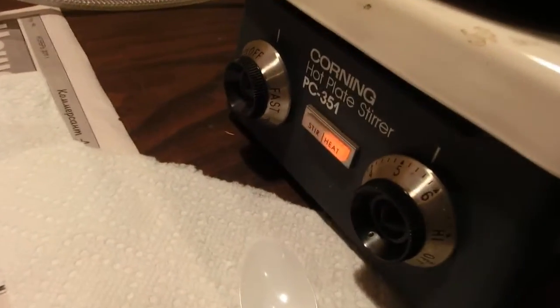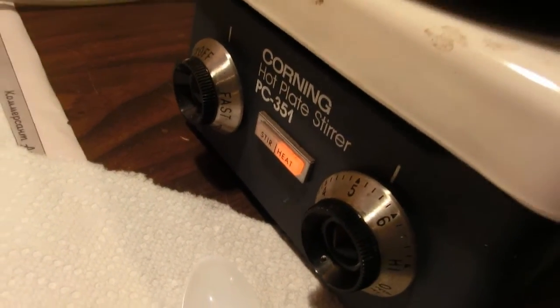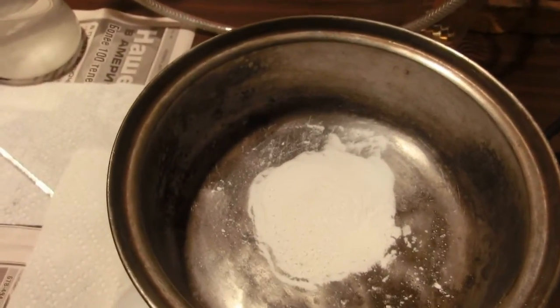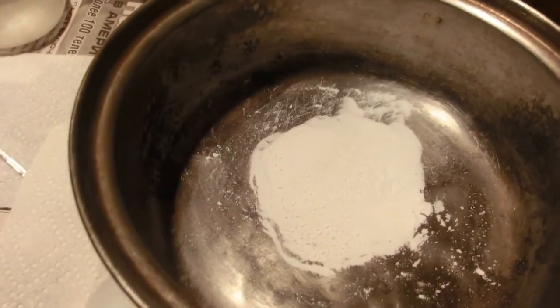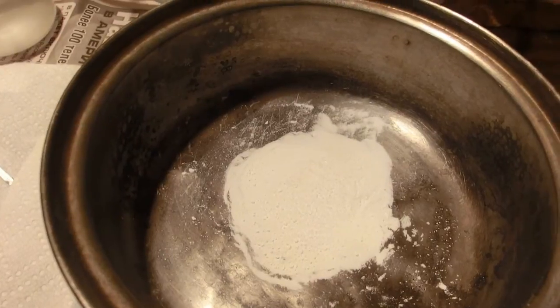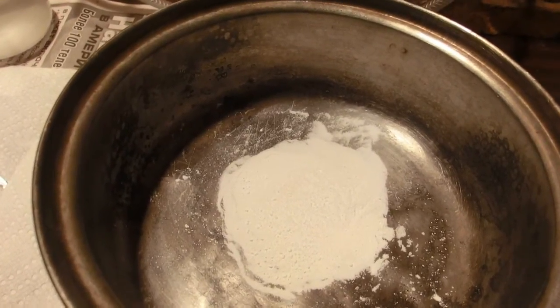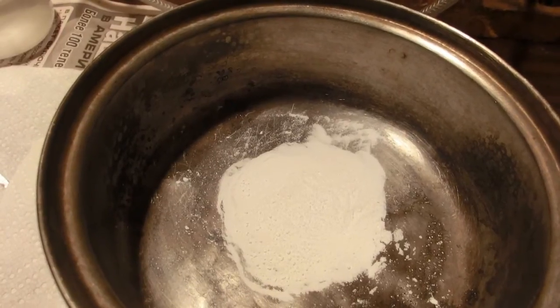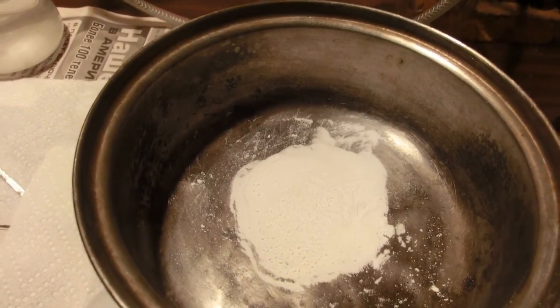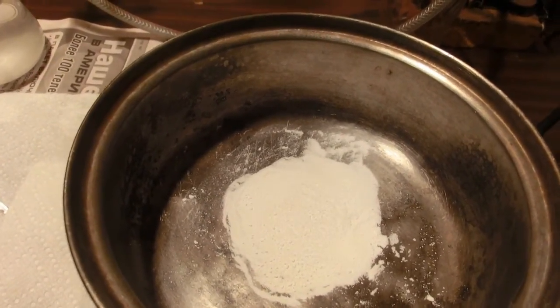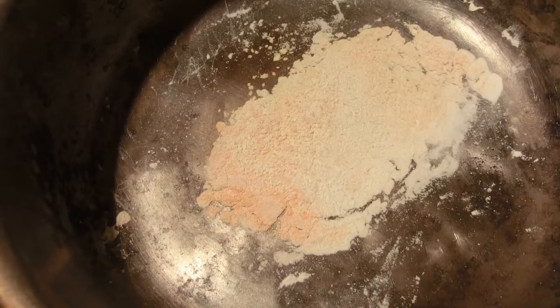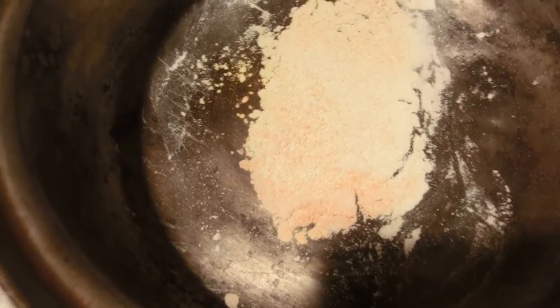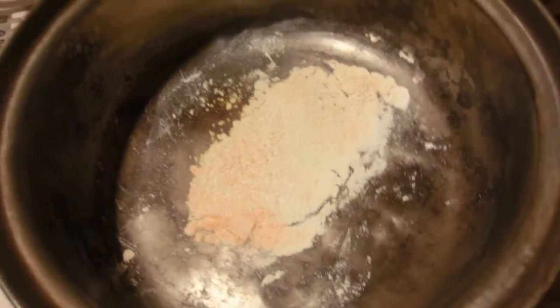So here I have a little bit of the lead carbonate in this pan on the hot plate and I've got the setting at about five and a half. And I'm slowly bringing this up to heat because I don't want to overheat this stuff, because it'll turn into, I think it's beta lead dioxide or maybe it's the monoxide, I'm not sure. But what we want is the lead tetraoxide which is red lead. You can see it's starting to turn color. Got a little bit of an orange and yellow going on.